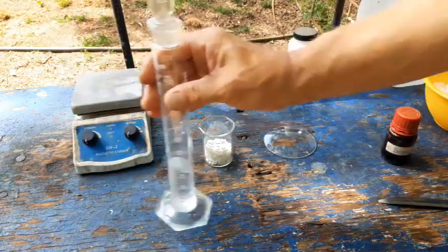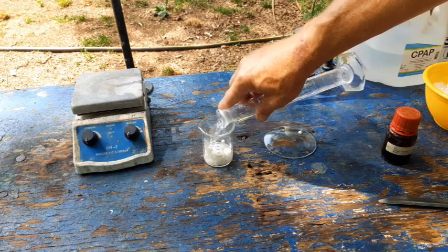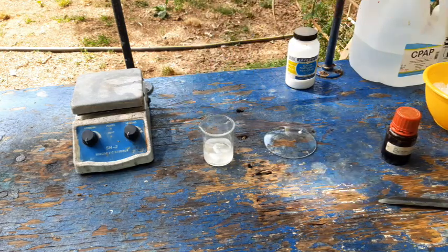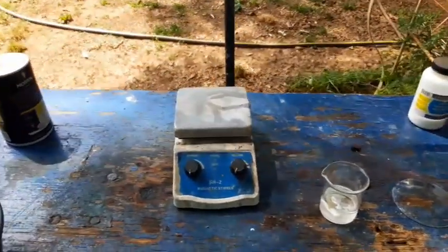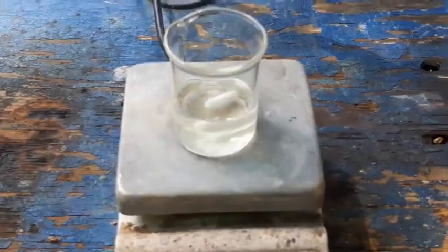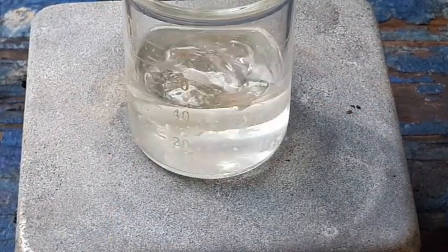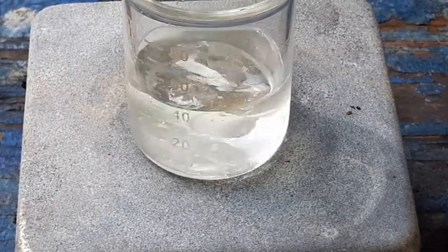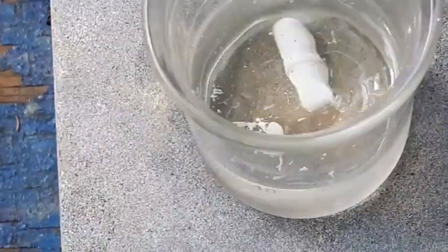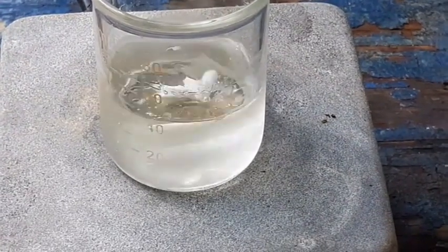Okay, so the first step is to dissolve our 5 grams of vanillin in about 33 mils of methanol. This prep originally is written to start from one mole of vanillin, like 157 grams. I scaled that down just a little bit. I was hoping it would dissolve easily — I didn't think it would dissolve quite that easily. Normally, it's a bitch and things don't dissolve. Well, that was significantly easier than I thought. Of course, there's always got to be that little bit that won't dissolve. All of it dissolves but a tiny little bit.